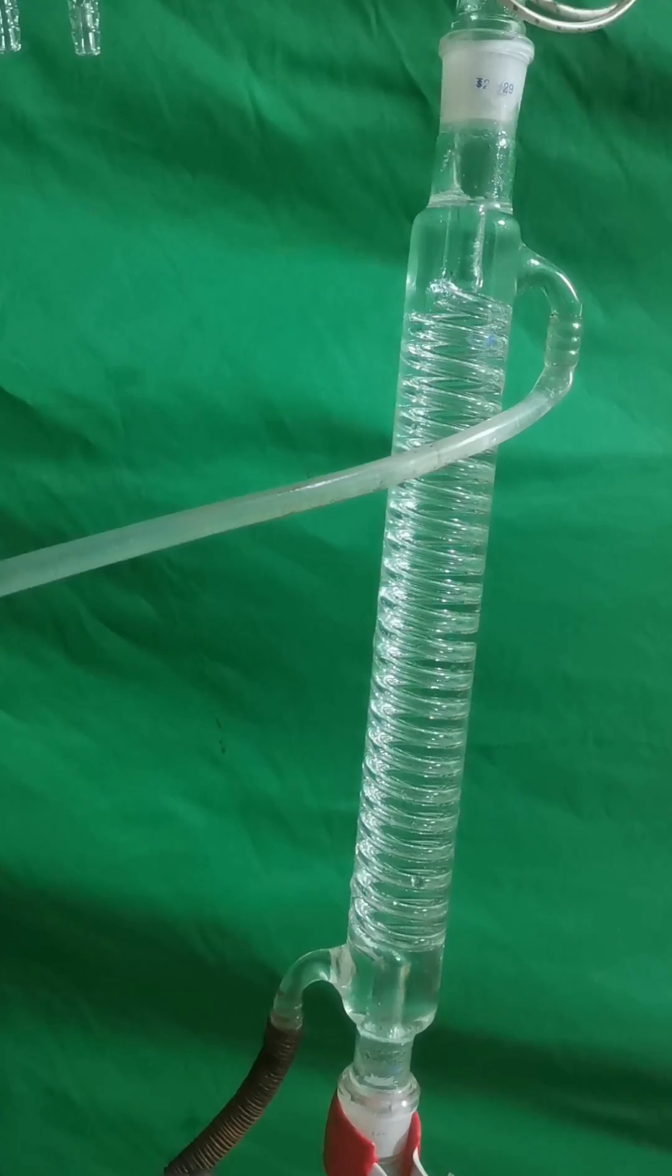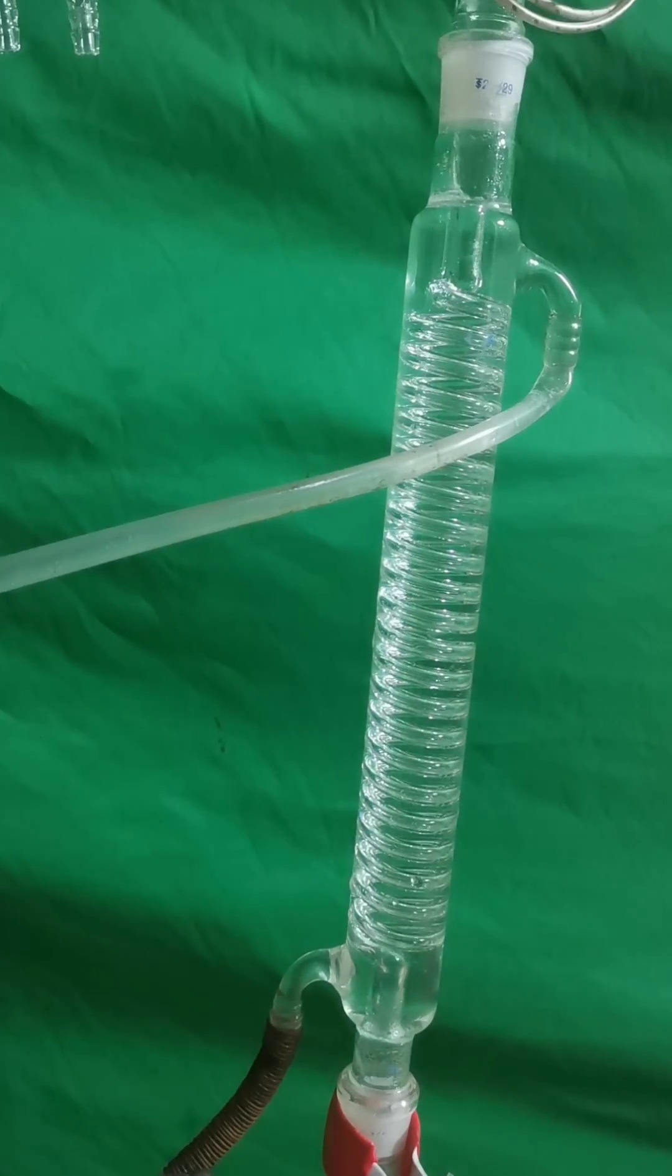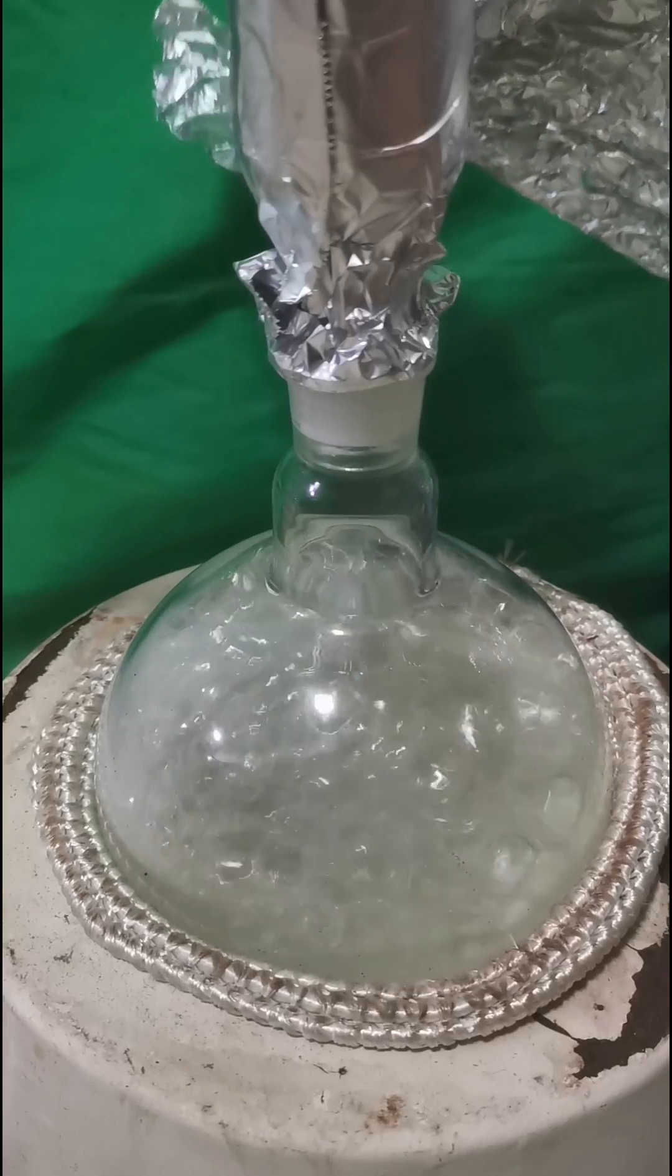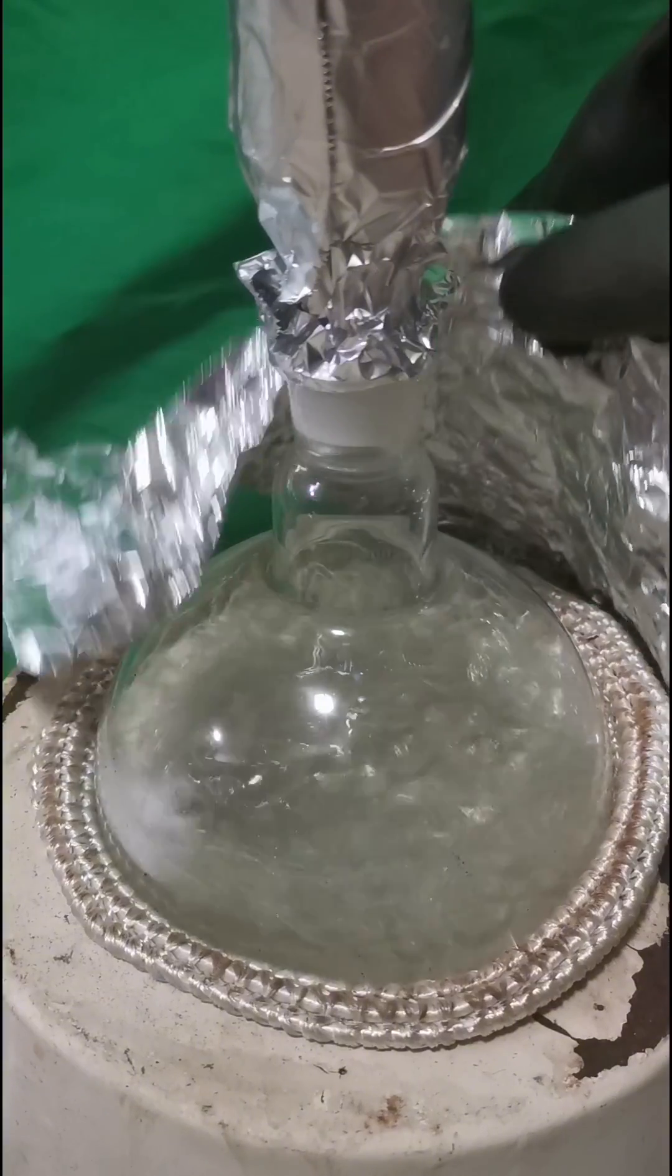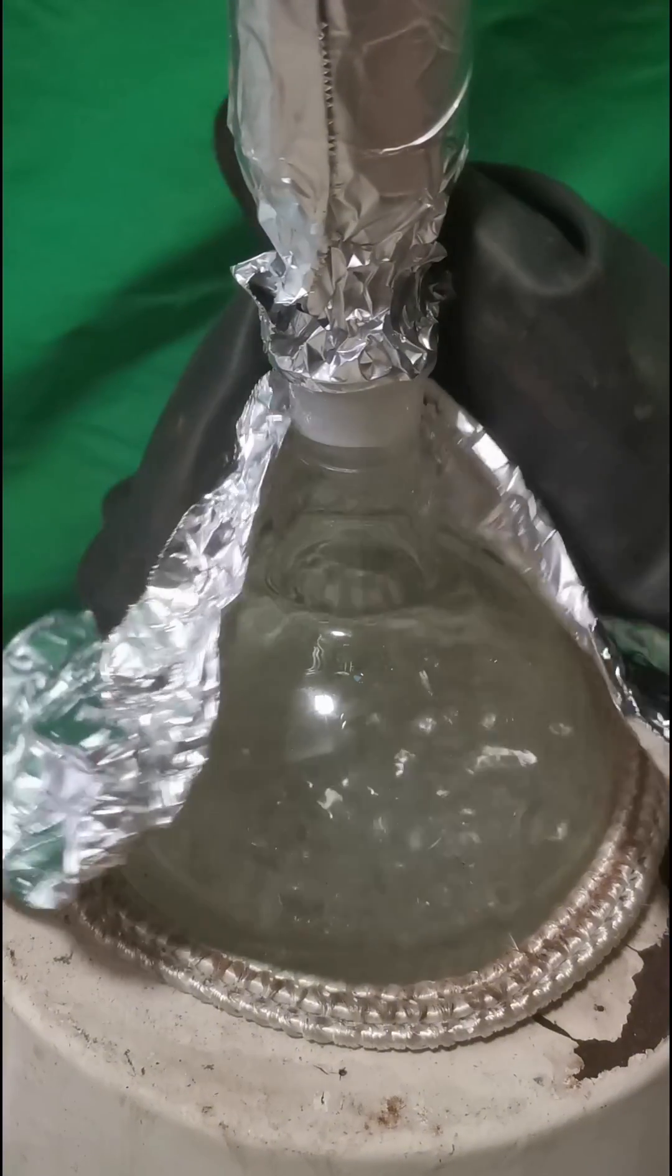This is the condenser. It should be covered with aluminum foil. This is boiling hydrogen peroxide, a kind of light-blue liquid. It will decompose as light.